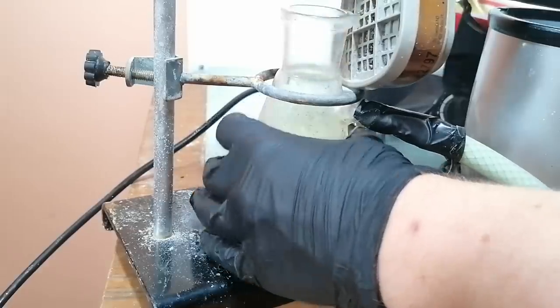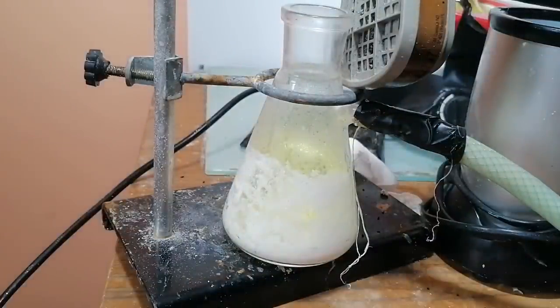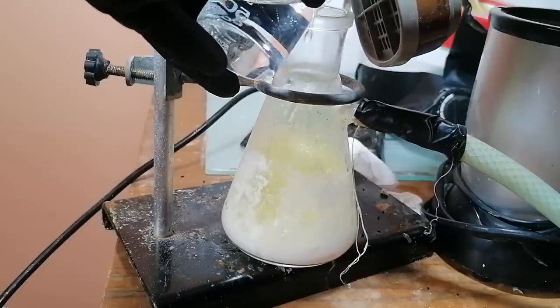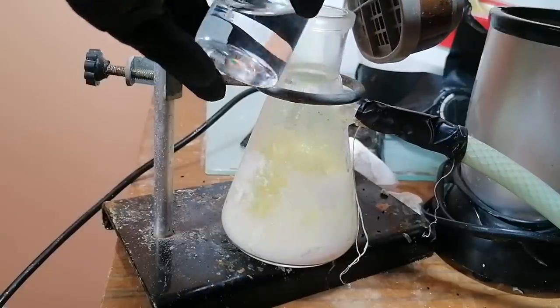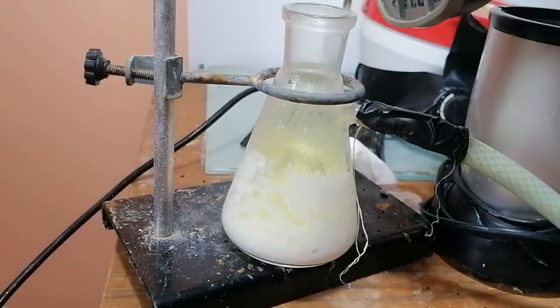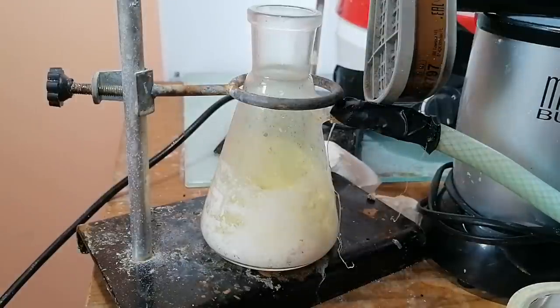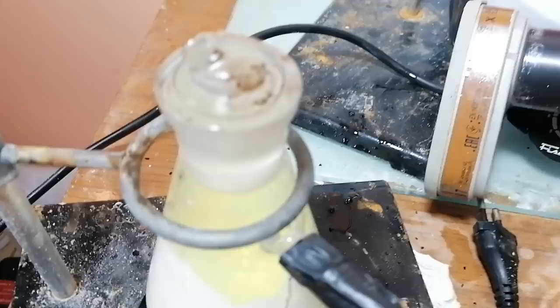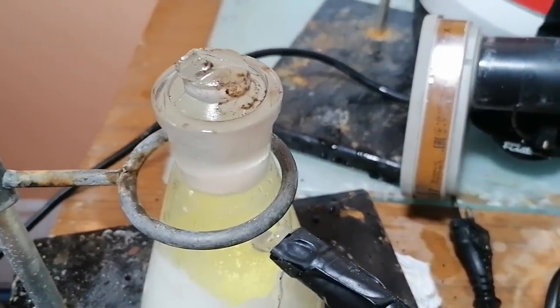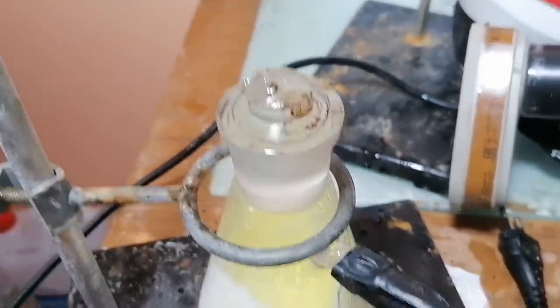Eventually I felt like the flow of chlorine had really slowed down, so I opened the flask and refilled the hydrochloric acid in the chlorine generator. To the right you can see there's a vacuum cleaner with a broken gas mask cartridge sucking up all the gas and filtering it — it's basically a poor man's fume hood. The whole opening-the-flask-with-clippers shtick kind of came back and bit me in the ass, mainly because I broke the stopper altogether and couldn't really refill the chlorine. And once I stopped, I guess there was an epic finale.